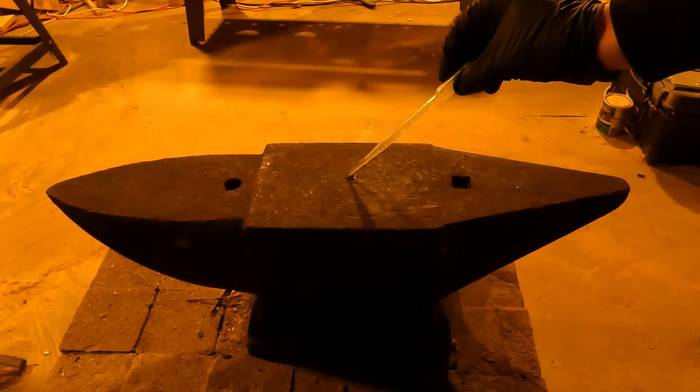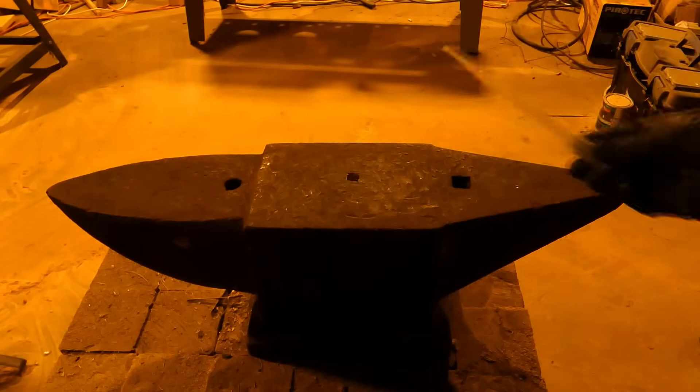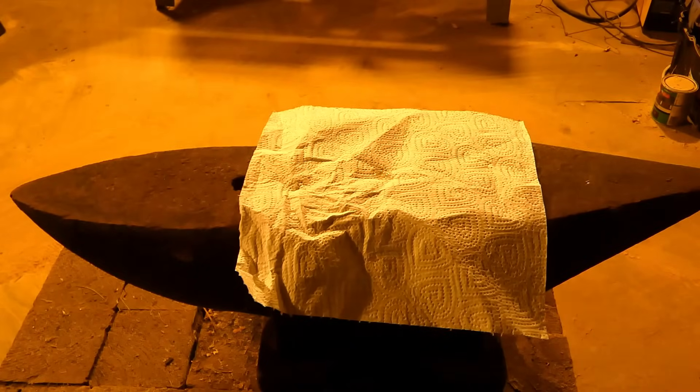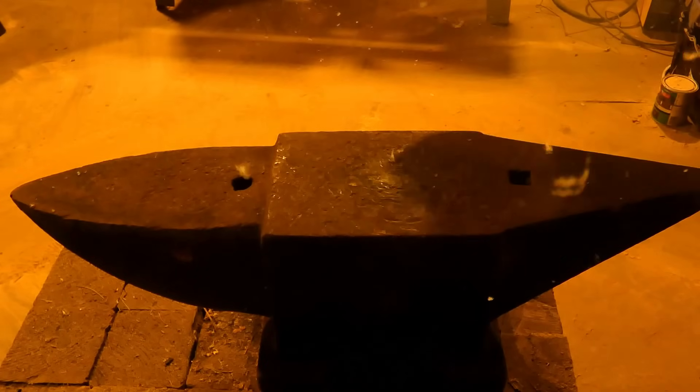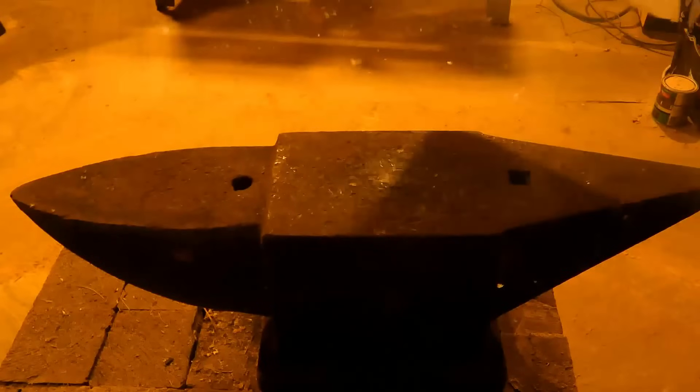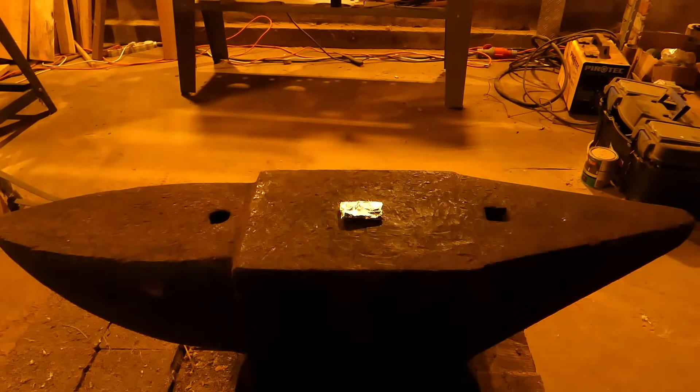To demonstrate this, I got a tiny amount of it onto an anvil and hit it with a hammer. It required quite a strong hit, but detonated really well, and if I wasn't wearing hearing protection, I would probably be temporarily deaf. It's just so freaking loud. It however isn't too sensitive, because I had a lot of failed attempts. To increase its sensitivity, it can be smacked on a piece of paper, which disintegrates into thousands of tiny pieces, but the best results by far are when it is contained in aluminum foil.